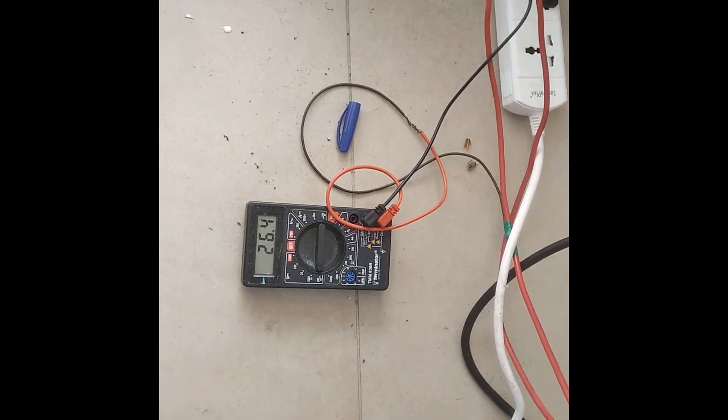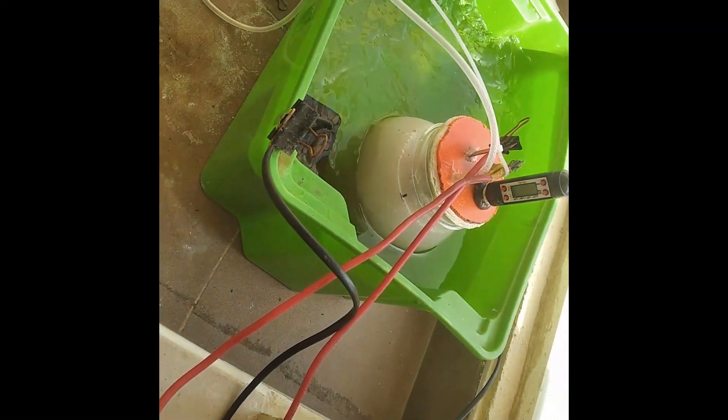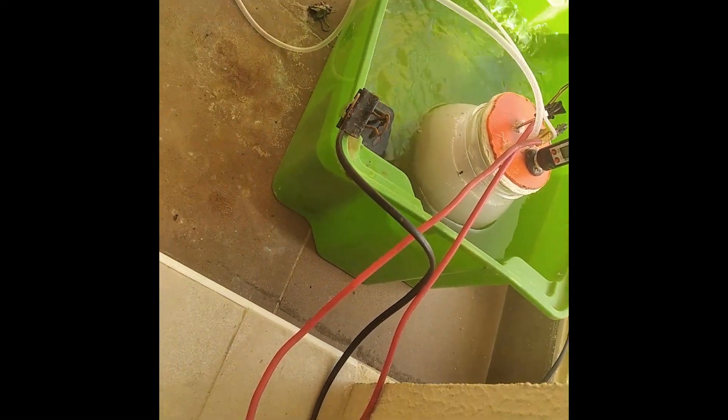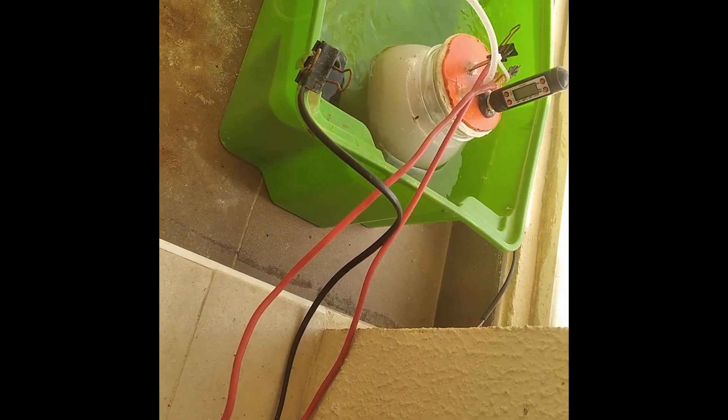This is now running at 200 milliamps per centimeter squared, around 15.5 amps of current. That's the cell. The electrodes survive as long as you keep the temperature low. These are the lead dioxide composite substrate, lead dioxide plated electrodes.